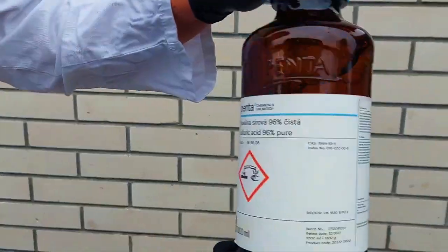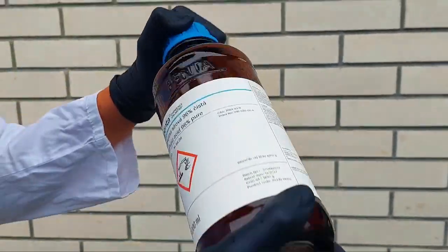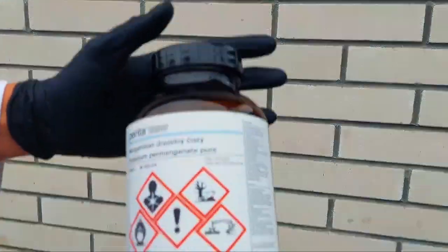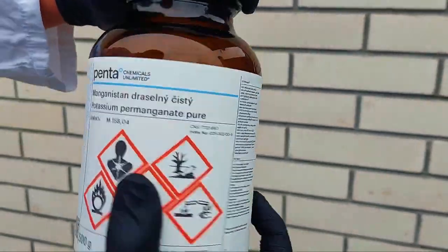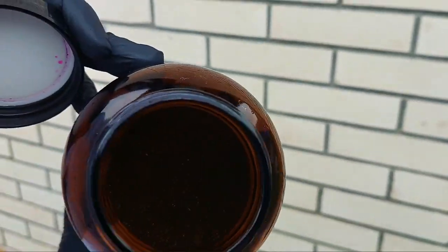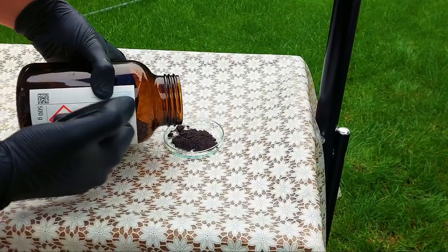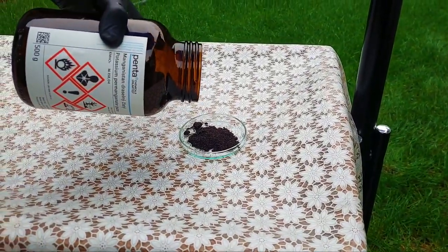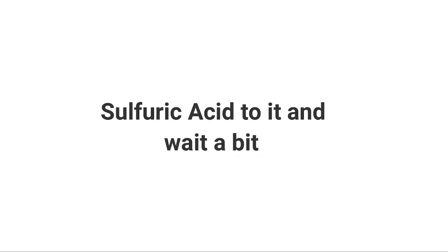To do that we will need some concentrated sulfuric acid, some potassium permanganate, and a petri dish. Firstly we need to add some permanganate to a dish, and then we need to add some concentrated sulfuric acid to it and wait a bit.